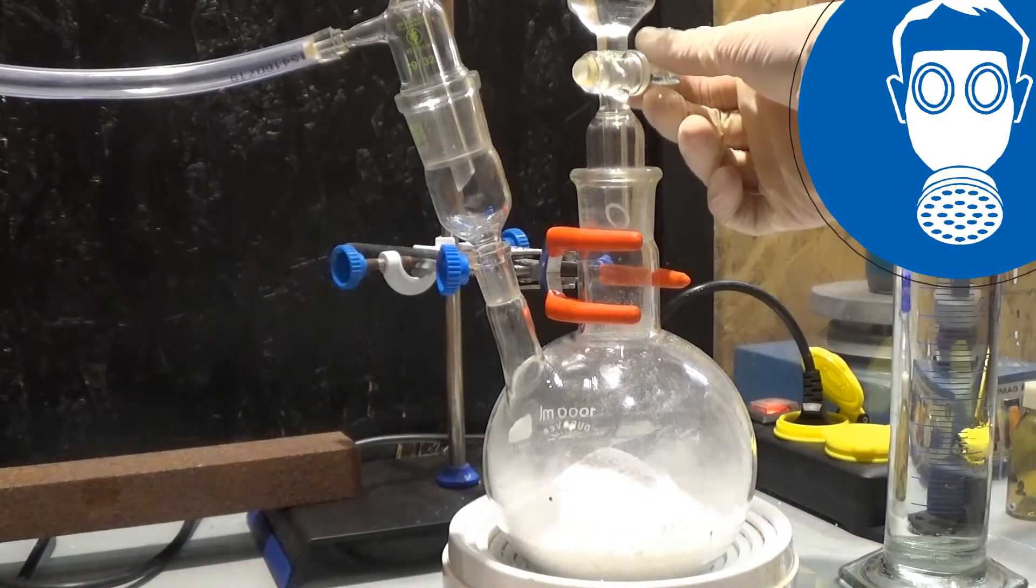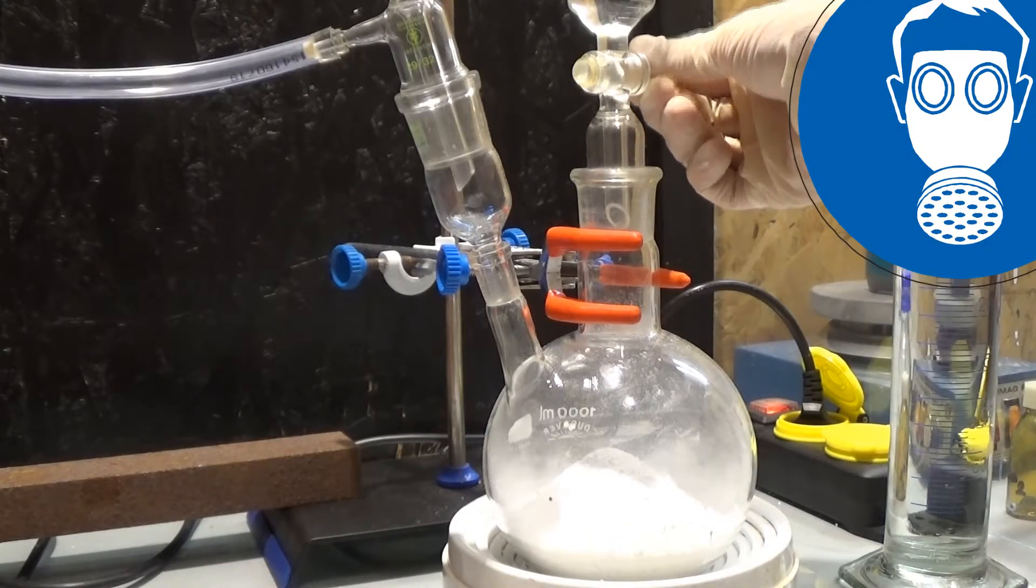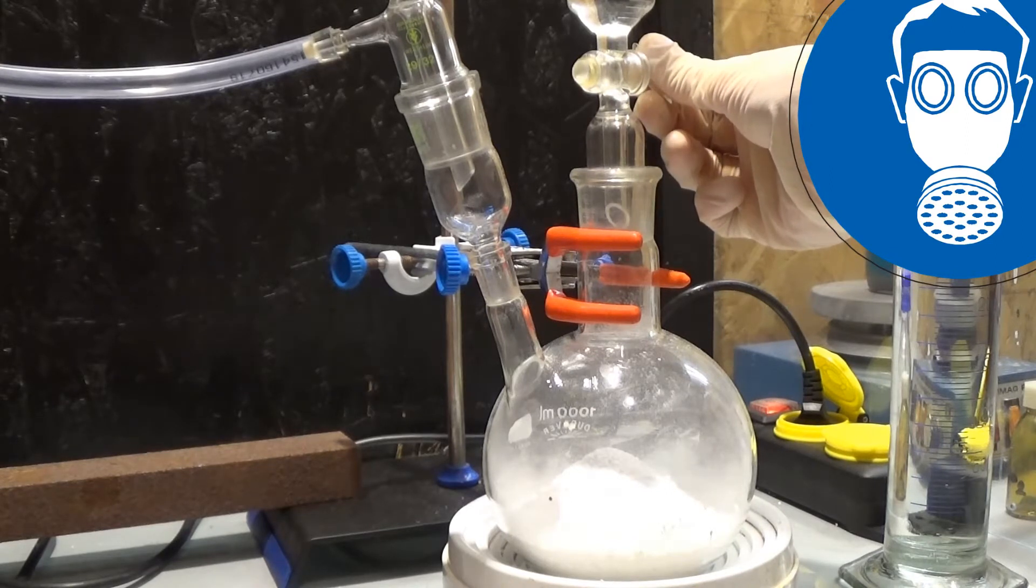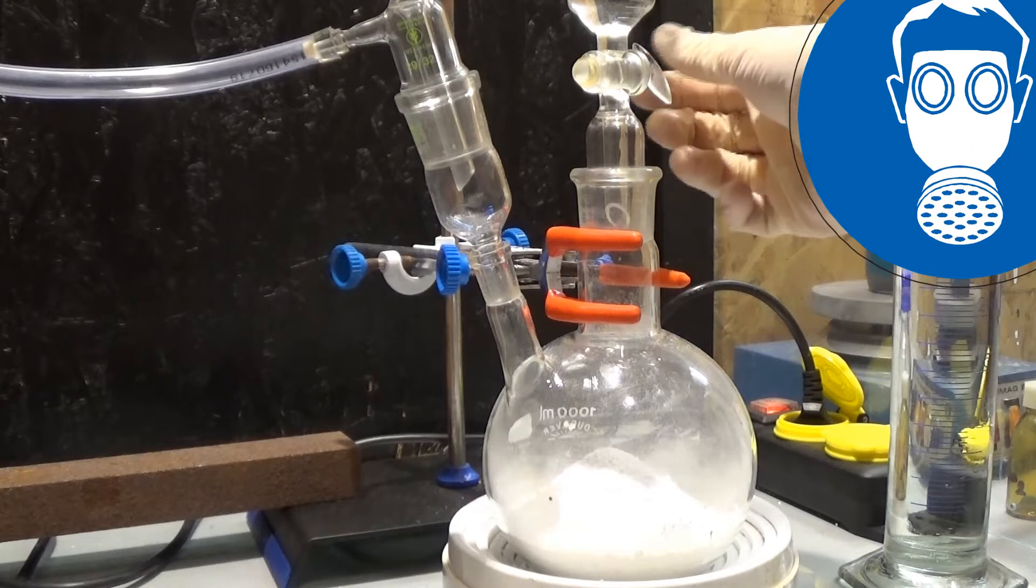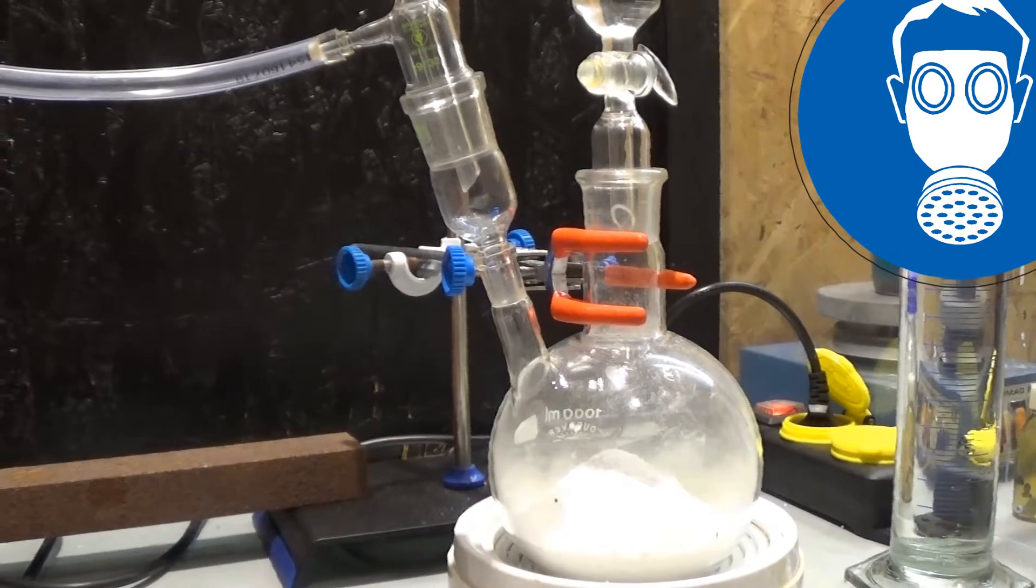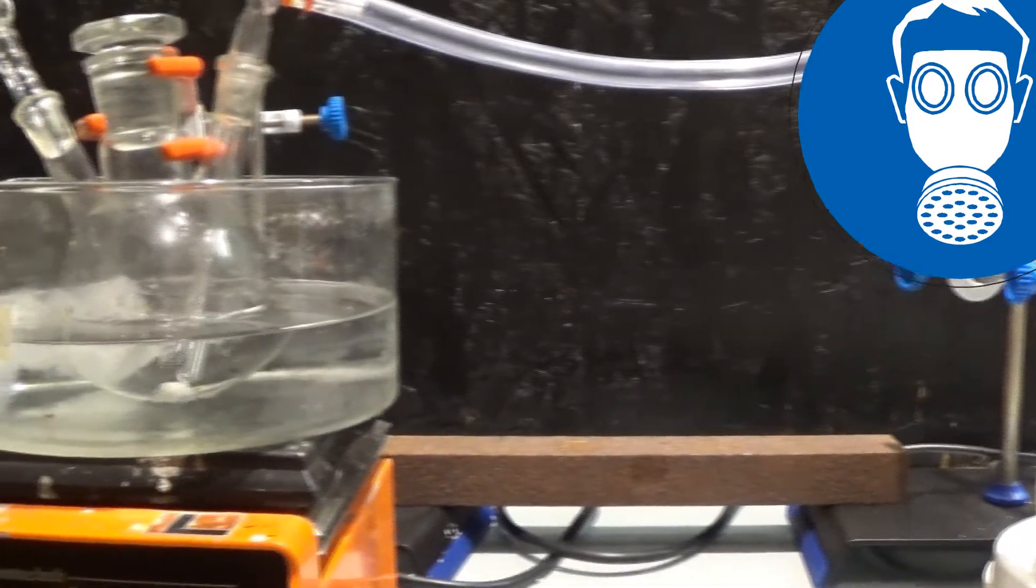To start the reaction I am slowly adding the hydrochloric acid to the trichloroisocyanuric acid. This generates 3 mol chlorine gas out of 1 mol TCCA and 3 mol hydrochloric acid, and in this case 4 mol chlorine gas for our reaction.